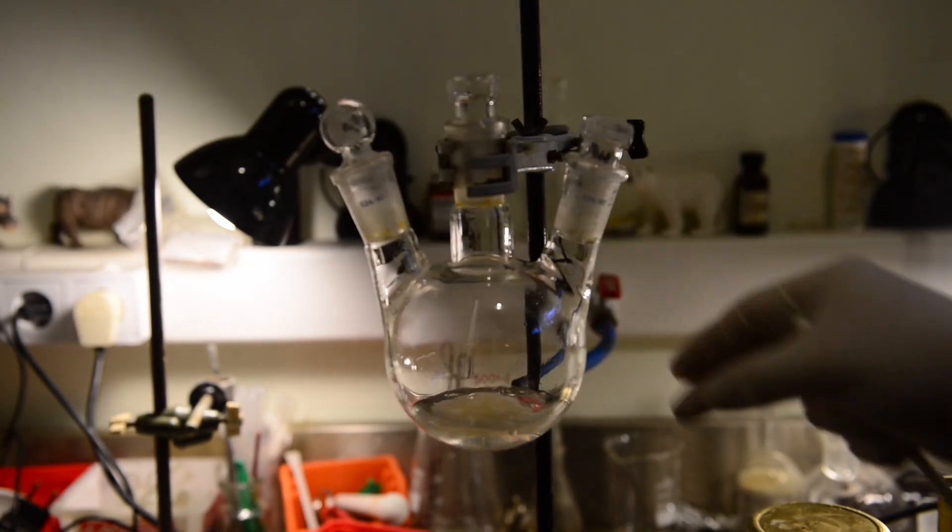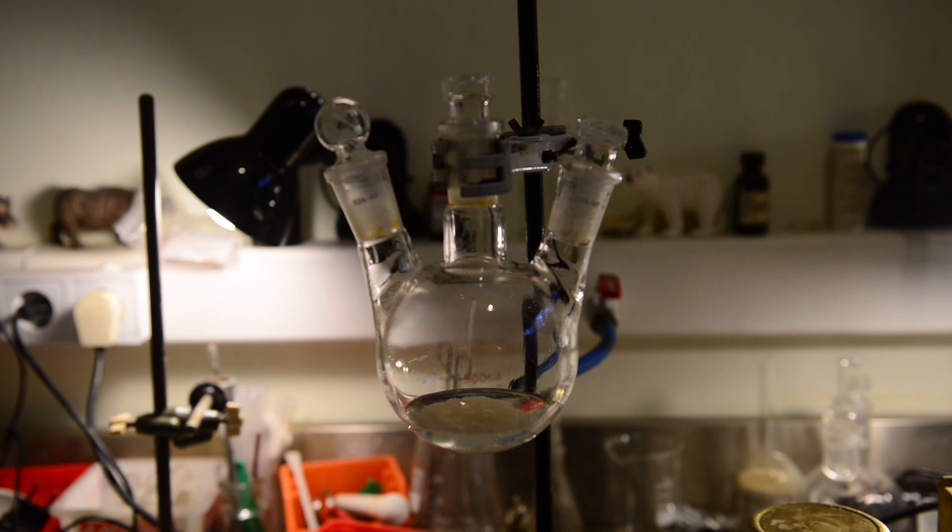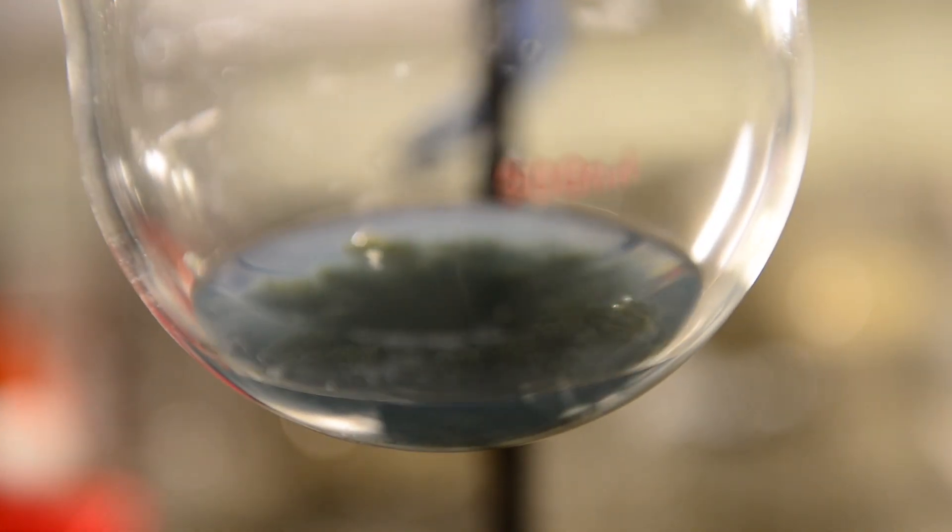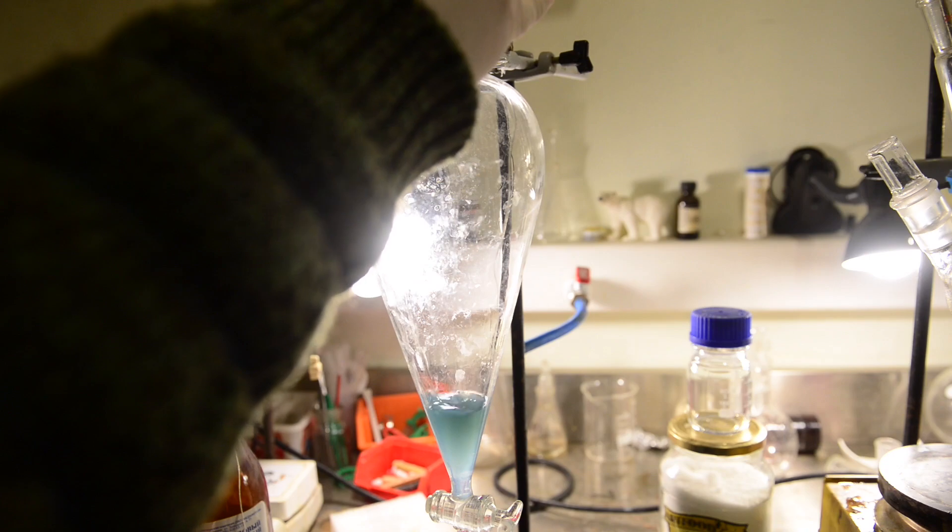At this point, the solids in the flask become chunky and the liquid turns into faint blue coloration. We are decanting the liquid to the separation funnel.